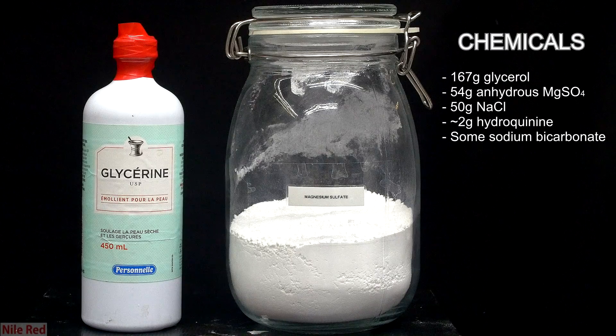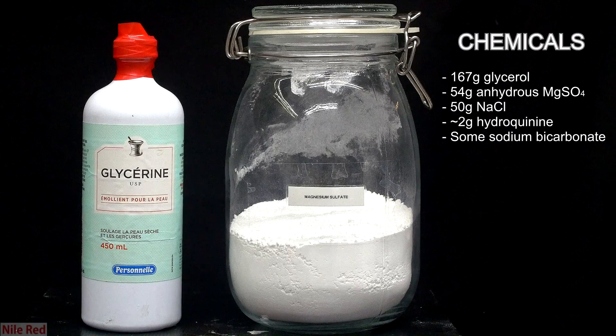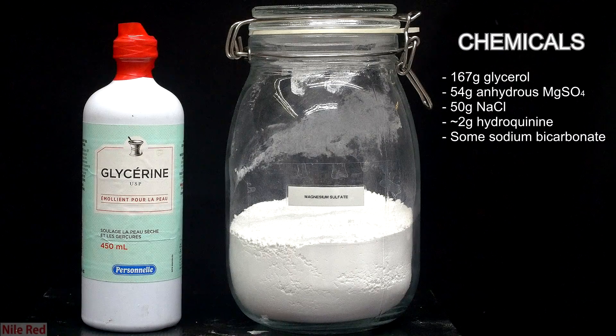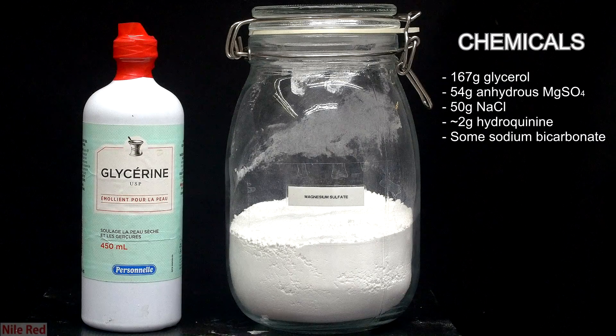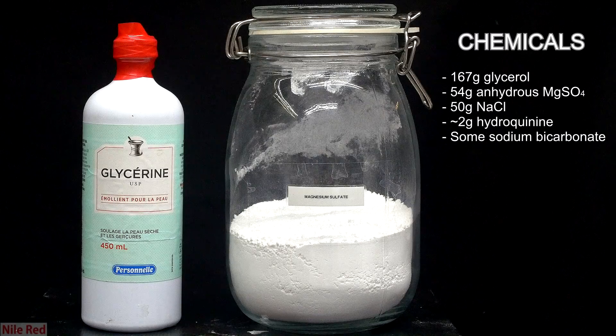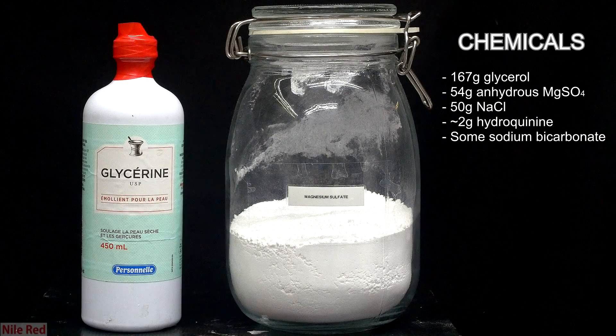So here's what we need to prepare the acrolein. On the left, we have our glycerol, and on the right, we have anhydrous magnesium sulfate. The magnesium sulfate in this reaction acts as a catalyst, and I'll explain later on what it's really doing.